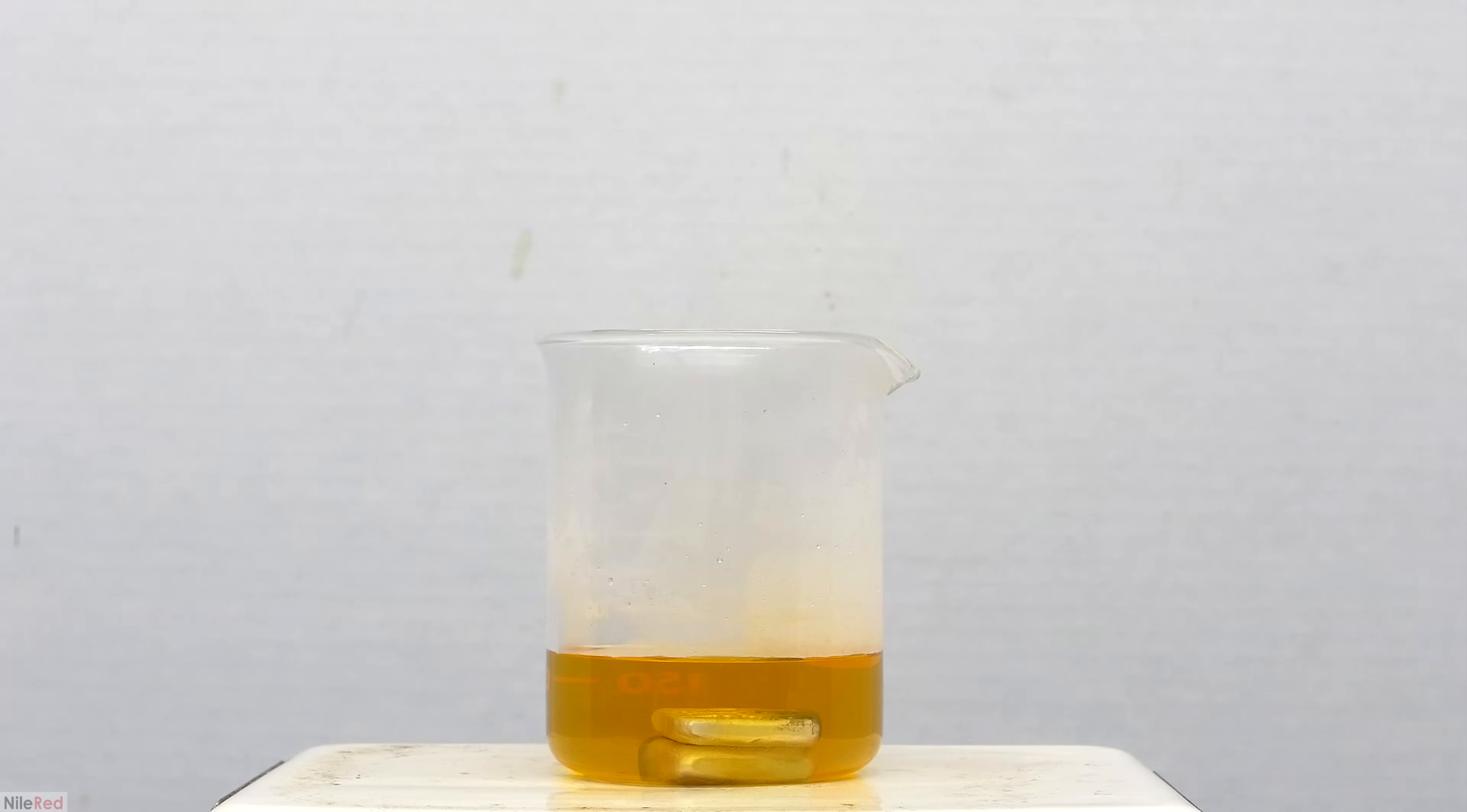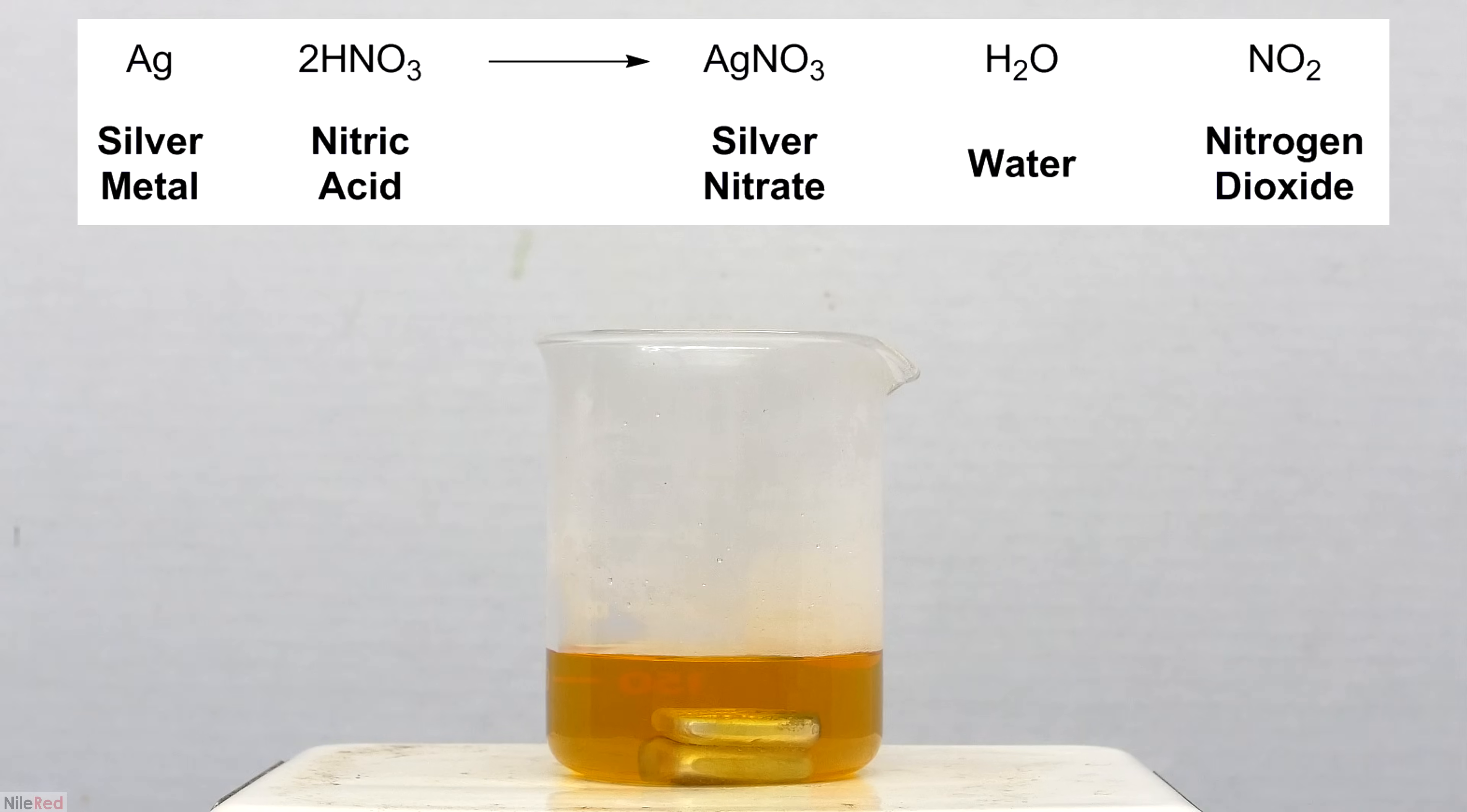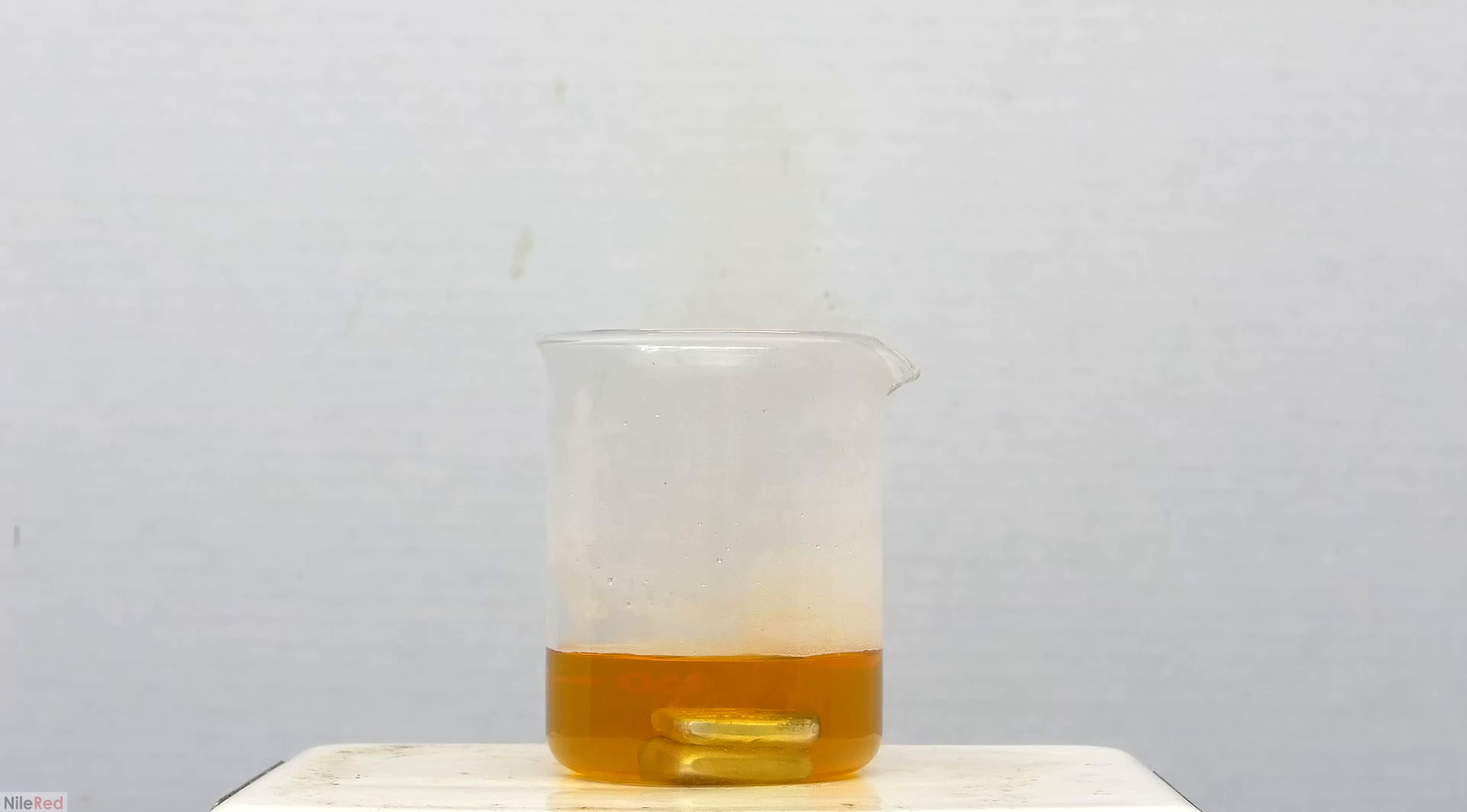As we continue to heat things, the color will transition from a yellow to an orange and eventually to a near red. The overall reaction is shown here where silver is reacting with nitric acid to form silver nitrate, nitrogen dioxide gas, and water. The nitrogen dioxide gas is what gives the solution its color, and the more nitrogen dioxide we produce, the darker the solution is going to get.